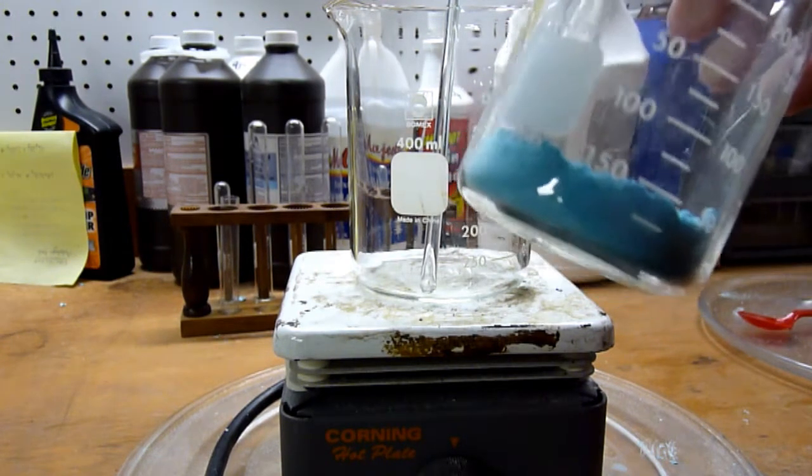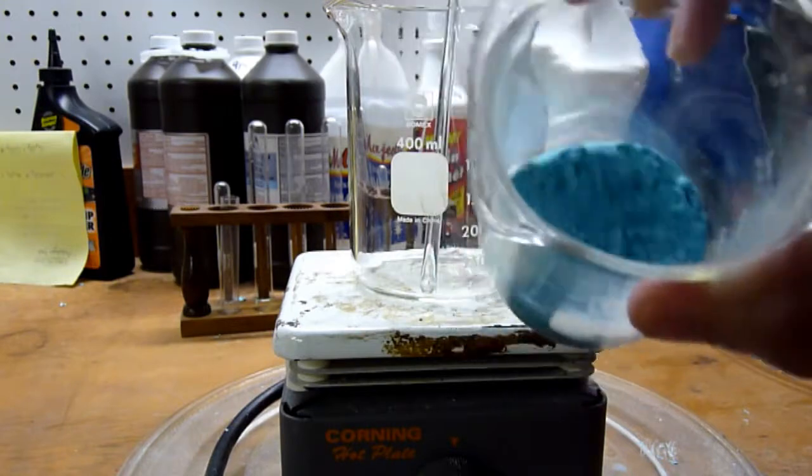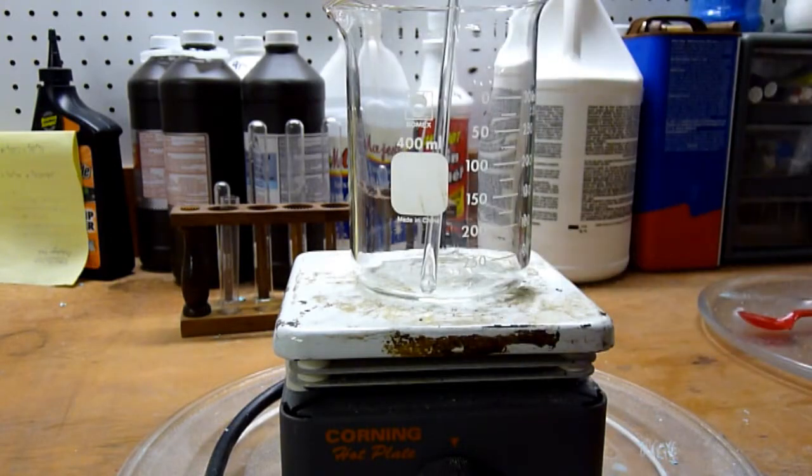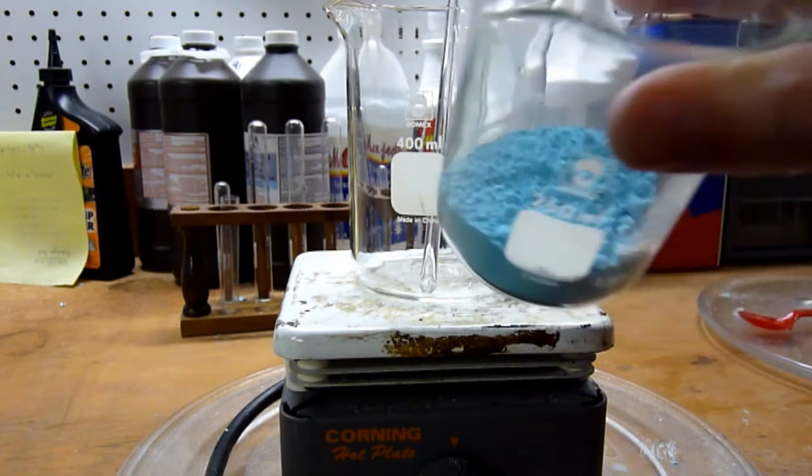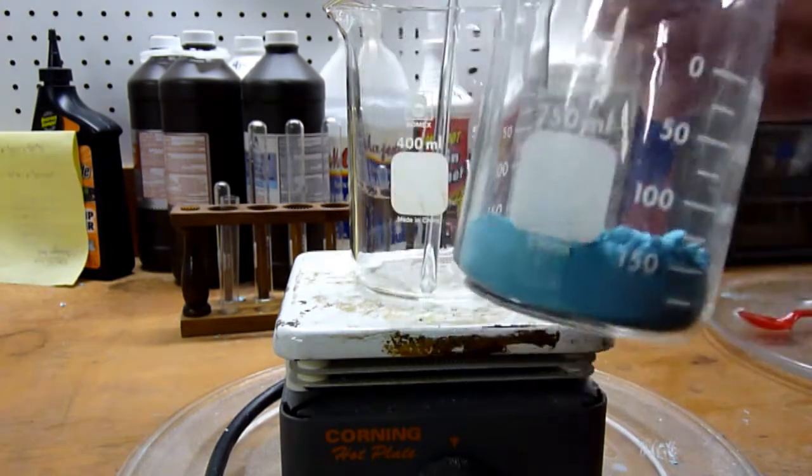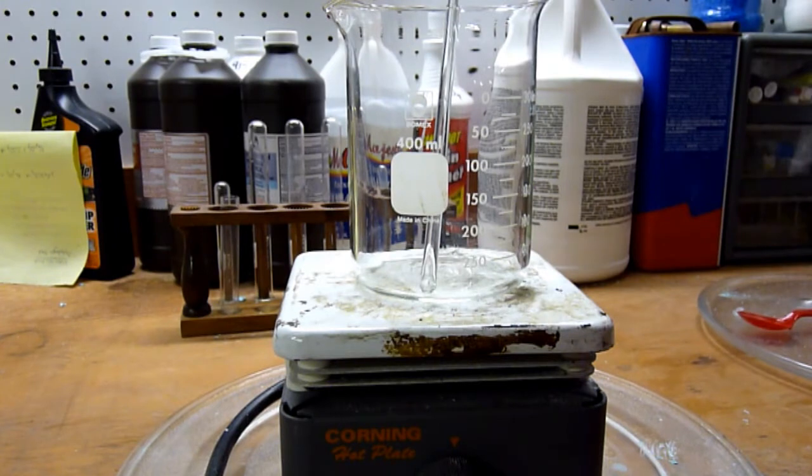Now this is the copper carbonate which we've prepared in a previous video. There are various hydration states of copper carbonate and so it ranges from a pale blue to a dark green sort of color and we'll see that it'll be very apparent as we start heating it.